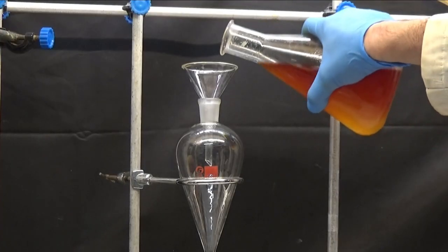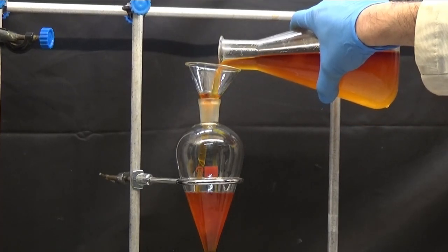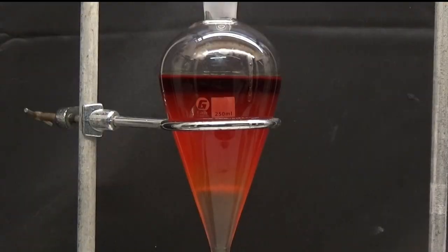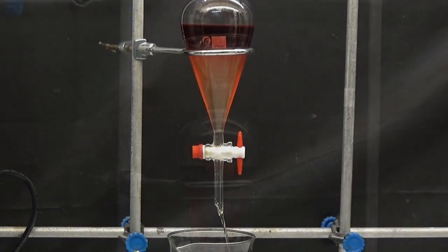To separate the organic layer, we use a separation funnel. Observe the separation of the layers. Decant the organic phase from the aqueous.